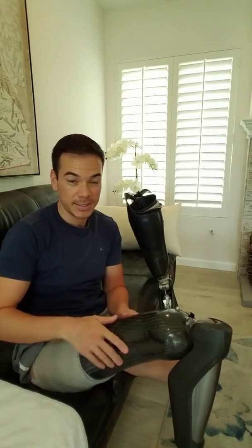You'll see when I take this off. For this one, I do need to remove the valve — I just got a new seal and liner here, which you'll see when I take this off. I actually don't need this sleeve anymore, but I wear it because it provides an extra level of stability in the back, which I like.